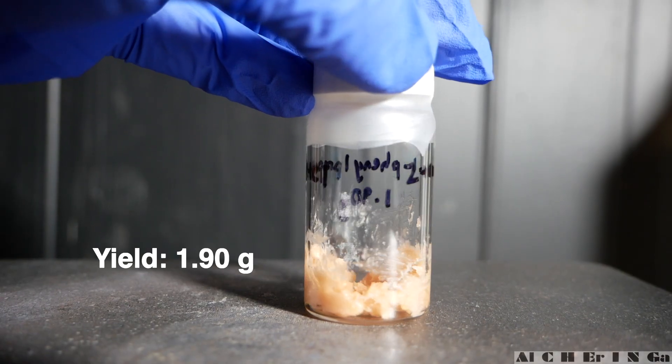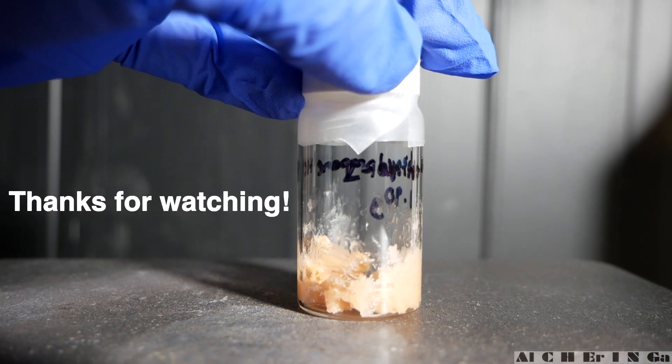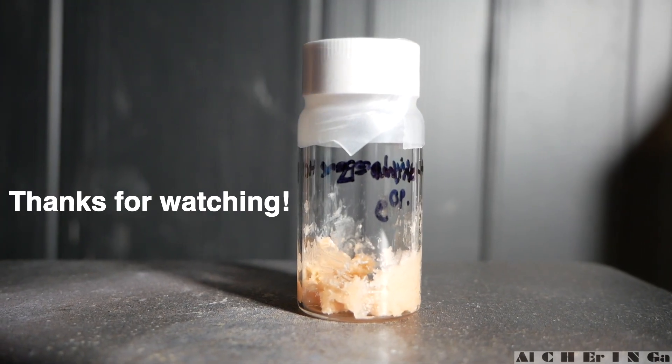The yield is 1.90 grams. Store the product in a dry, cool and dark place.